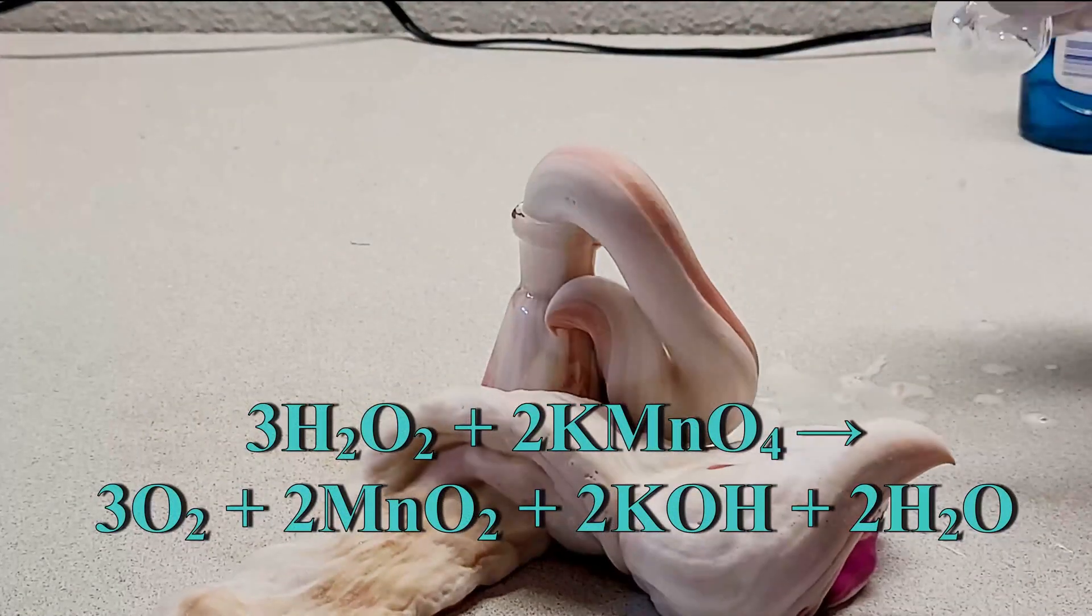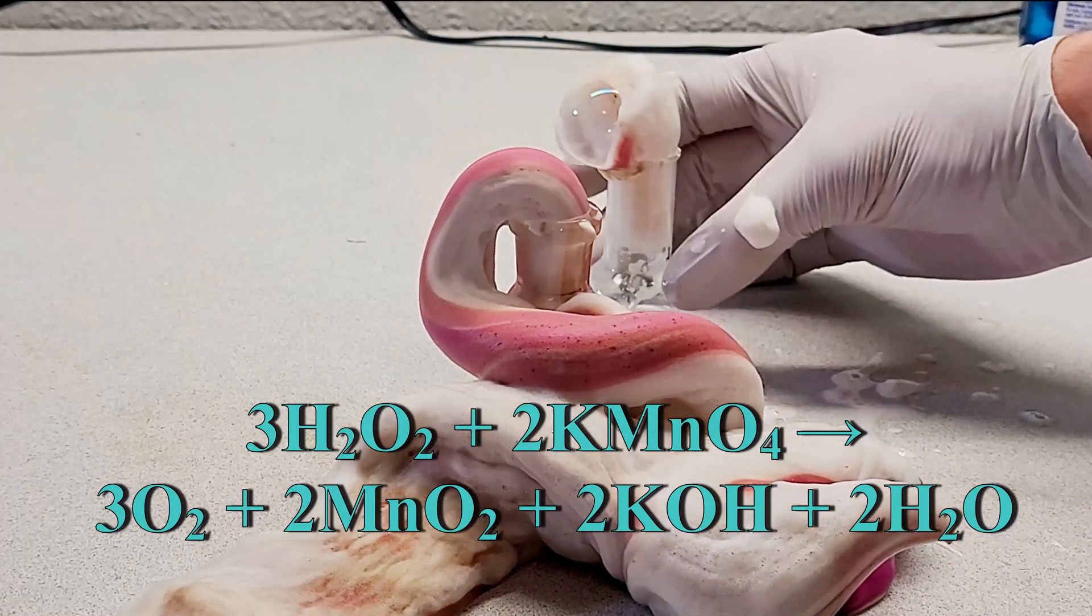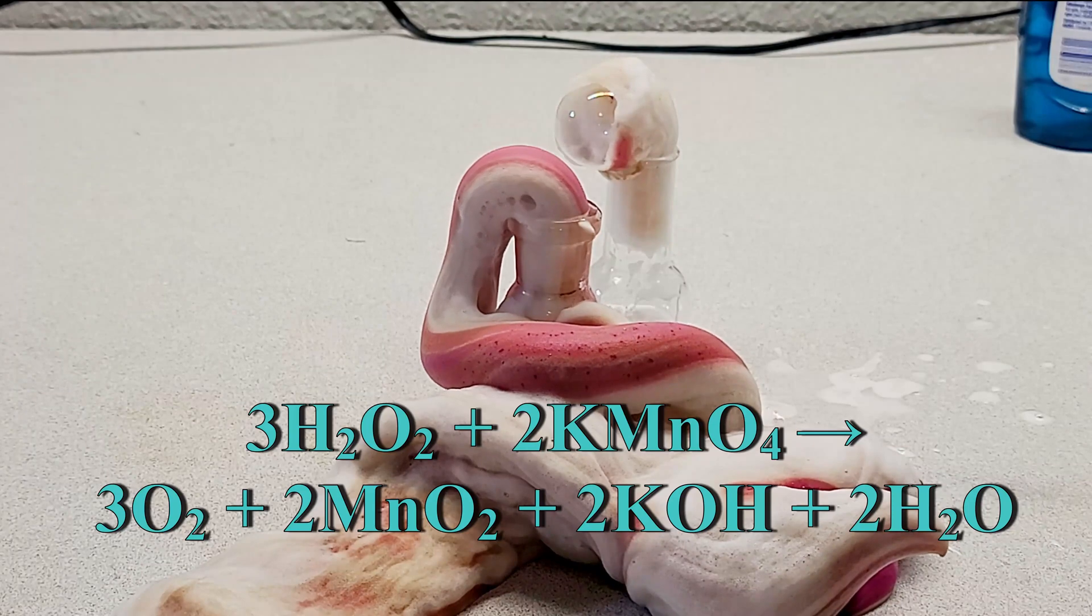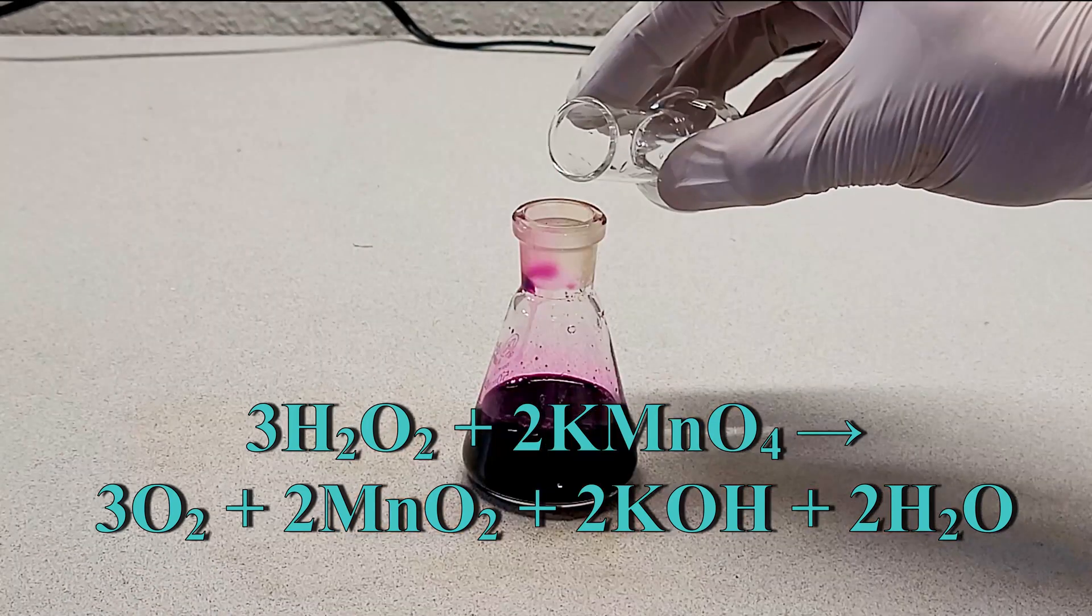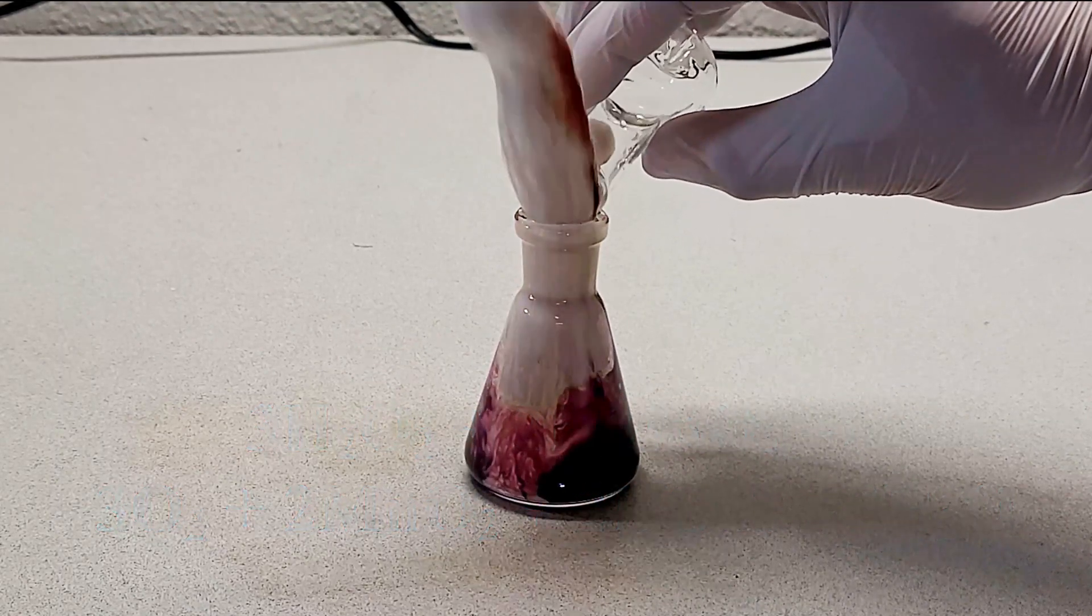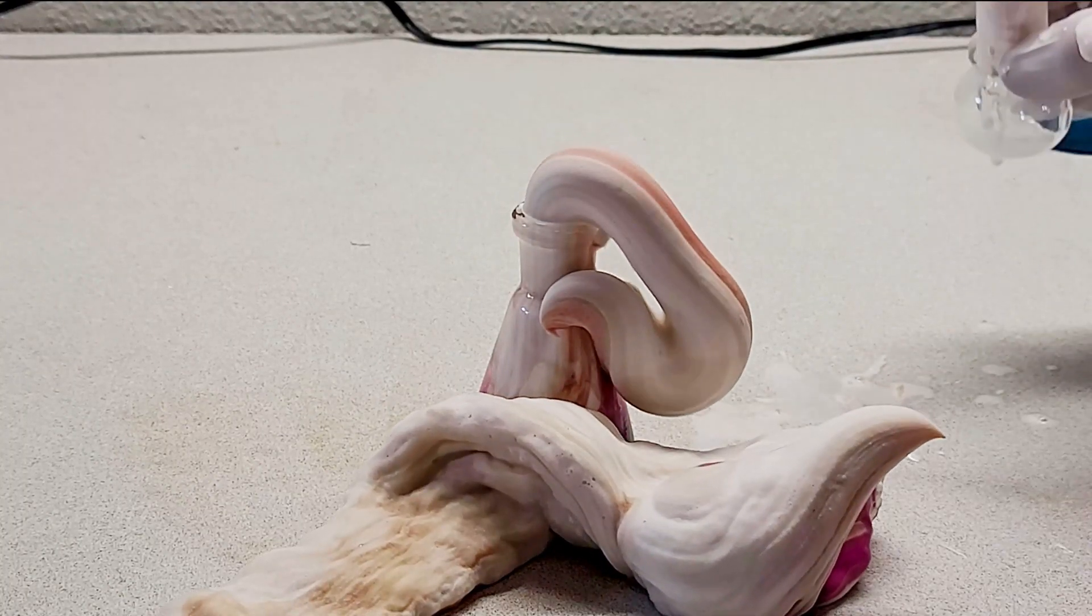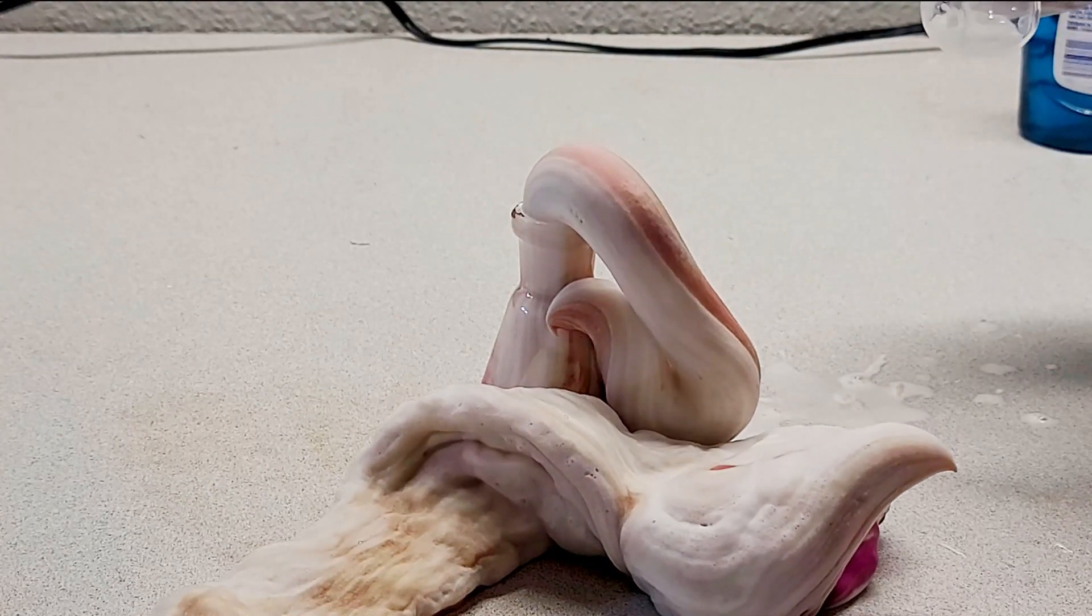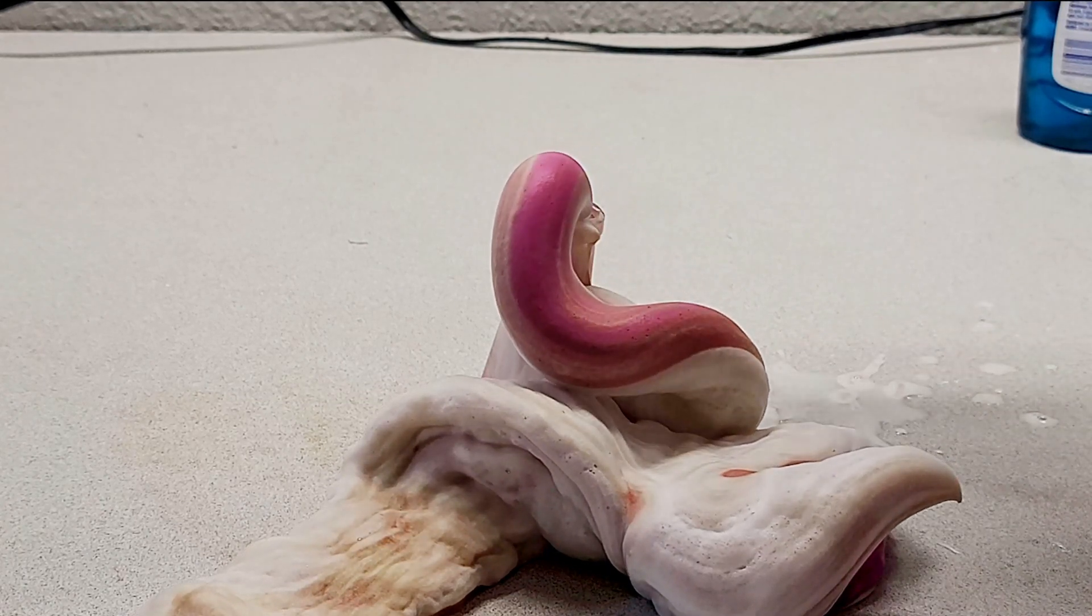And when the hydrogen peroxide and the potassium permanganate react, they'll form manganese dioxide, potassium hydroxide, water, and oxygen. Now this reaction happens pretty rapidly and gives off a lot of heat. The rapid release of all that oxygen in the presence of the detergent that we added results in the large amount of foam and volcano-like reaction that we see here.